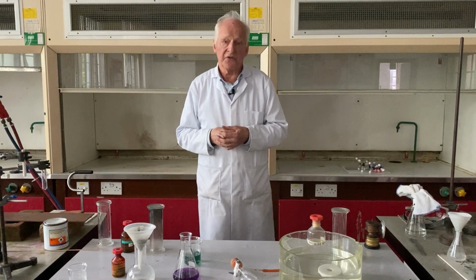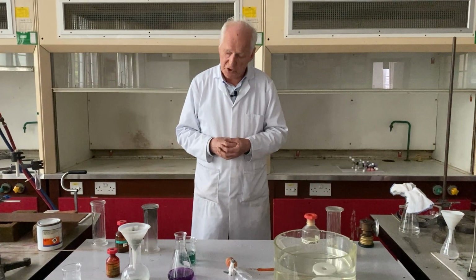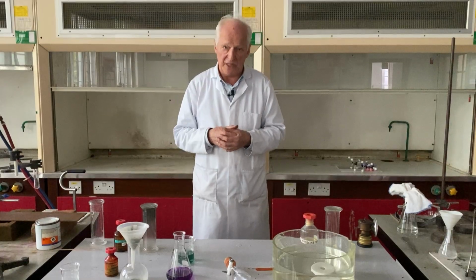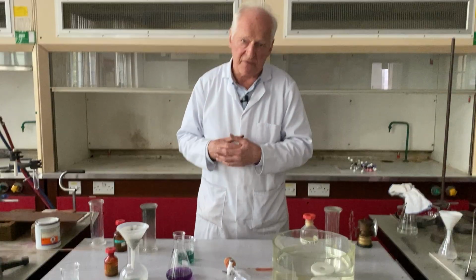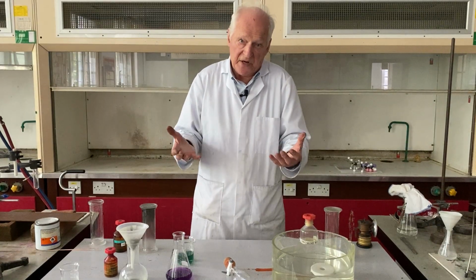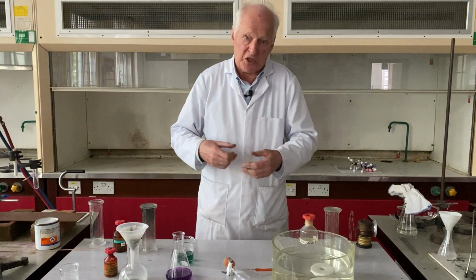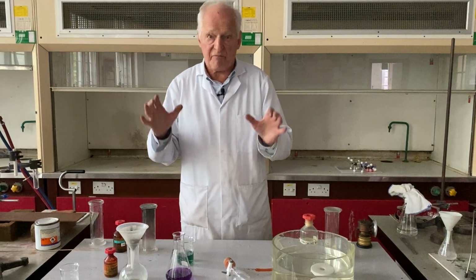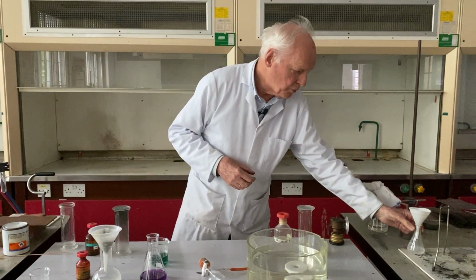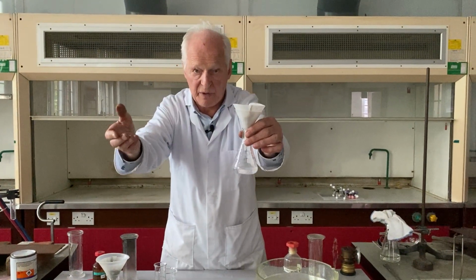Now, acetylene undergoes several other reactions, of which perhaps one of the most spectacular is its reaction with copper chloride solution or with silver nitrate solution. It forms a most unusual type of compound, which is unbelievably unstable and therefore very dangerous, and which detonates violently because of its instability. So I'm going to show you, we have prepared earlier a small sample of silver acetylide. Now, I've got the apparatus that we did this in. This takes a little while, by the way, which is why we prepared it in advance.